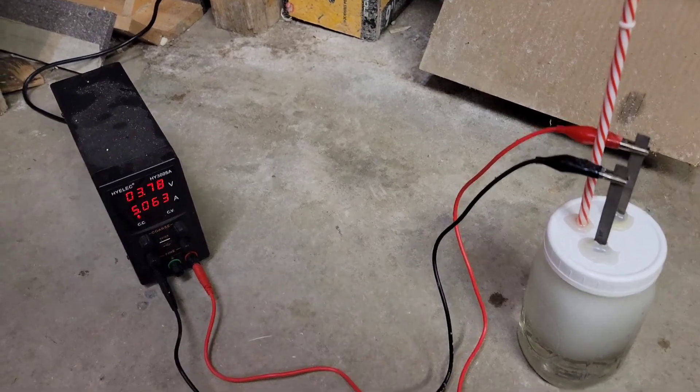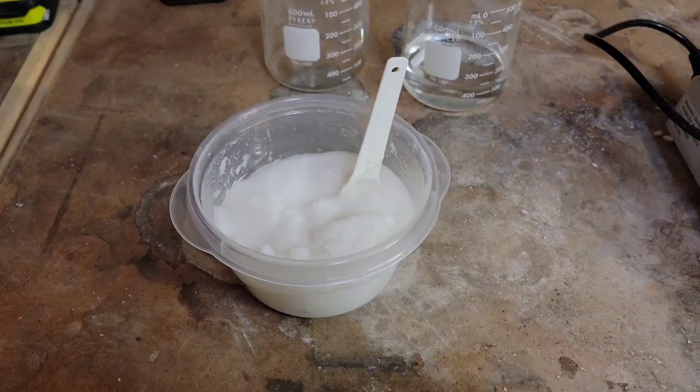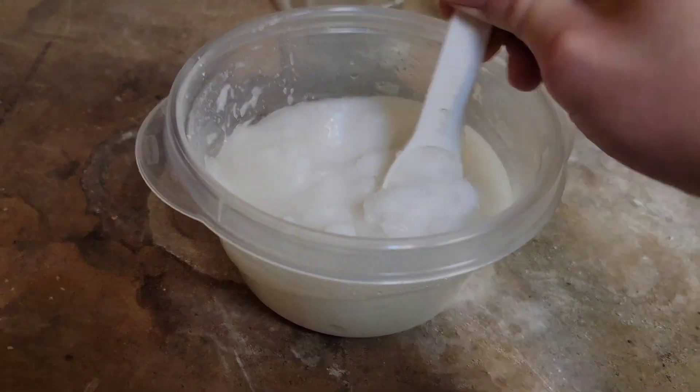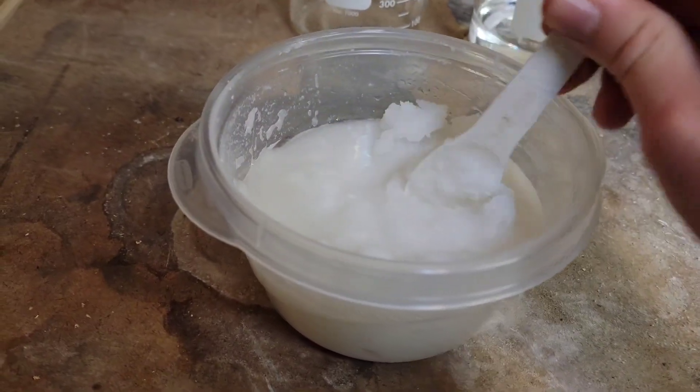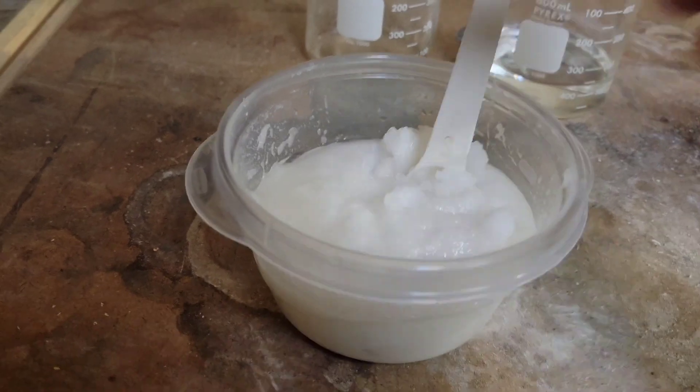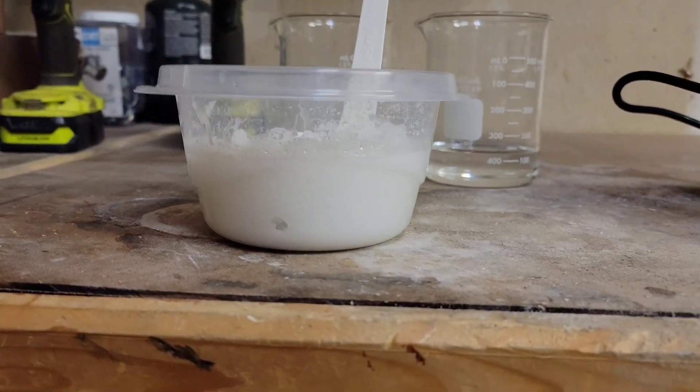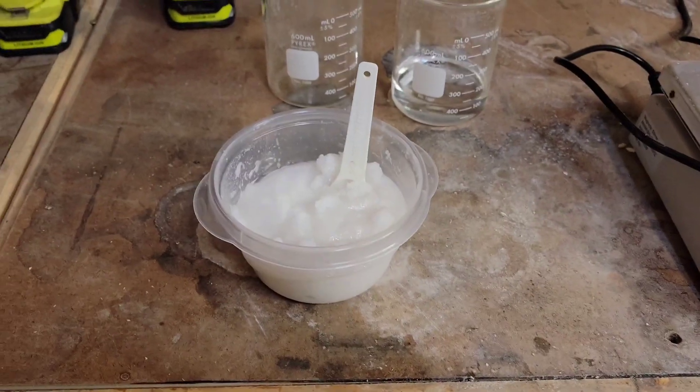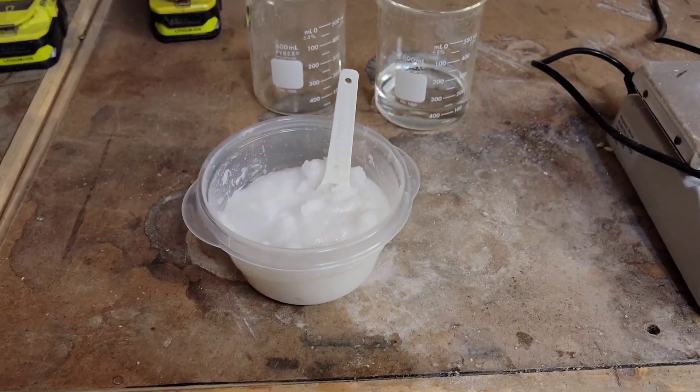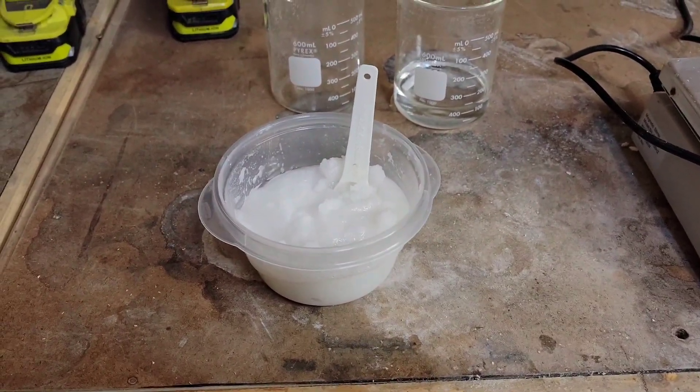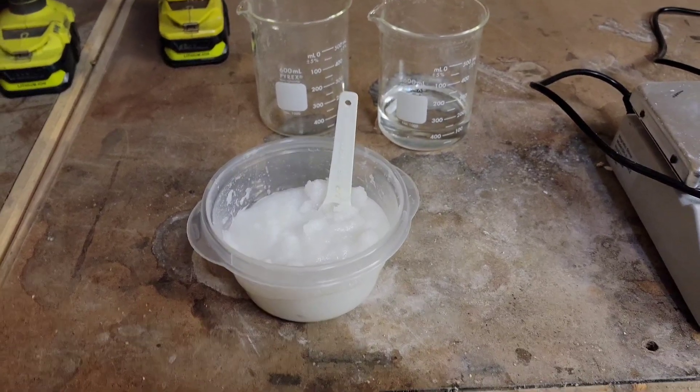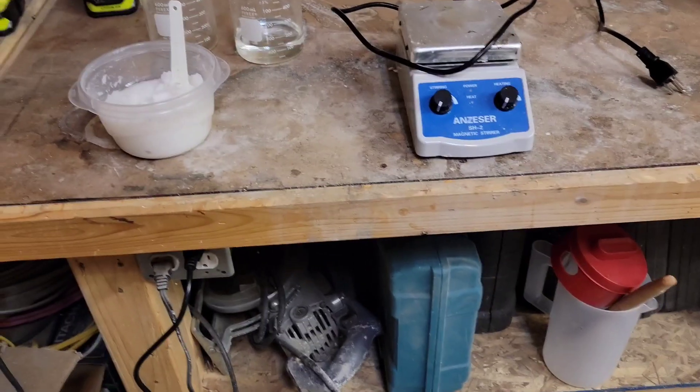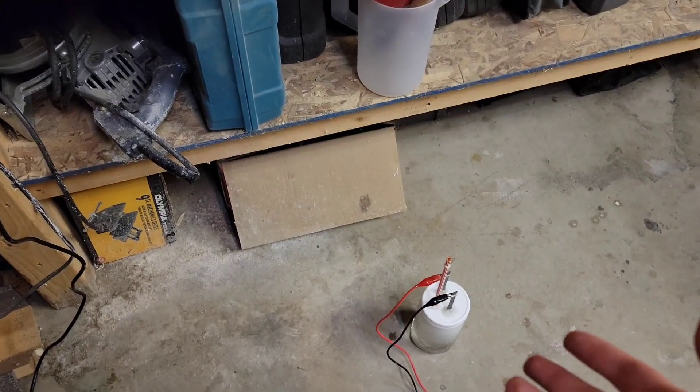This could be fun to point out too. This is actually my sodium chlorate crop from the last time I did it. It's a good bit, actually mixed with a lot of perchlorate because I was a couple days late in harvesting it. But it's pretty good. Hopefully I can get that batch again and then I'll combine both of these two because they're both very soluble and then we can start a perchlorate batch.